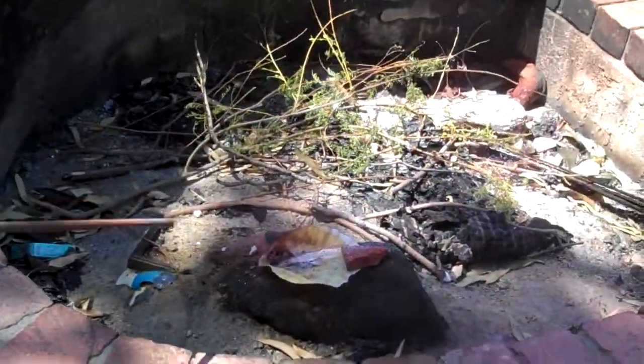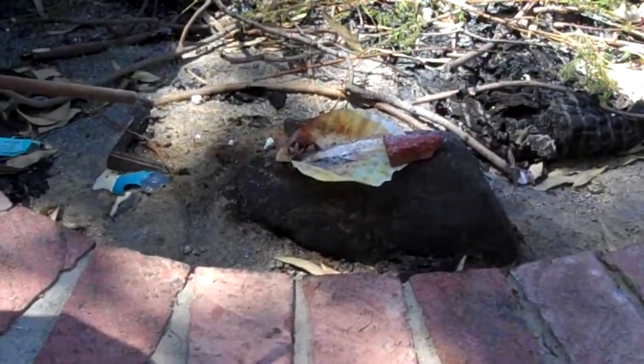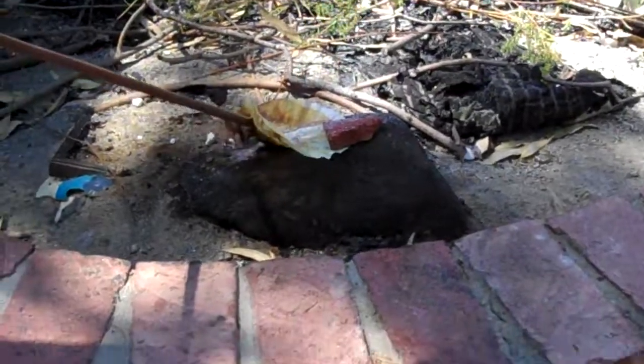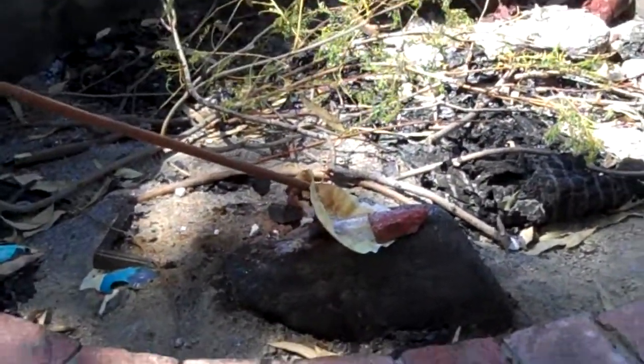That's not a good thing. Whoa, big purple! Conclusion? Yeah, that was it — it does not stabilize it. No, it doesn't. You saw the big purple? Yeah, the big purple. It blasted a hole in the filter.